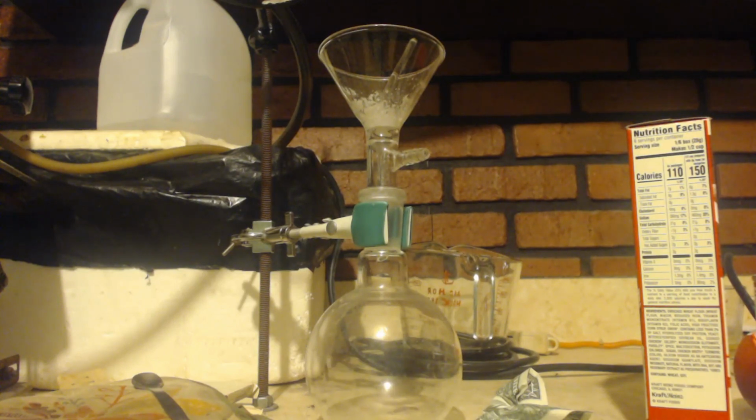Then I'll take the pot up to 120 C and start the reaction. At least that's my thoughts. And if it hurts the yield or whatever, then the next time I'll try it without the ethanol being part of the crystalline lattice.